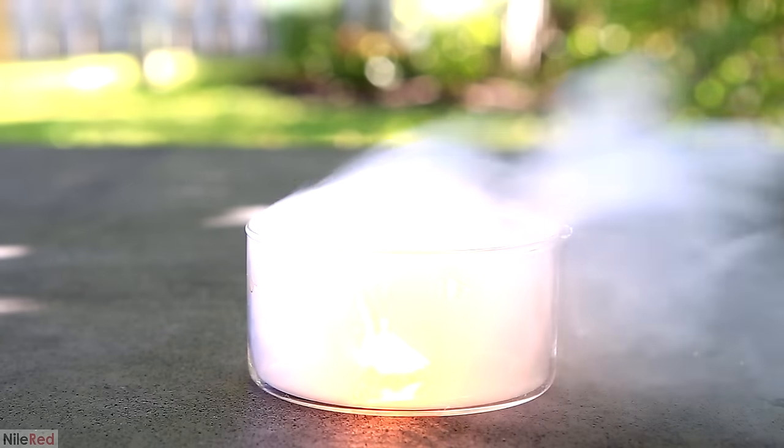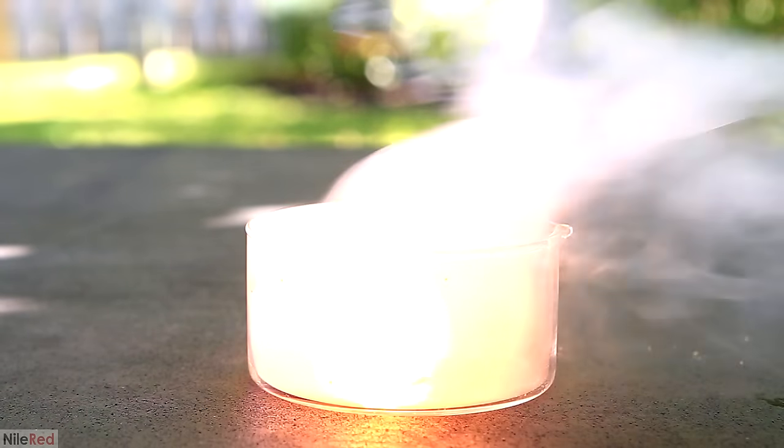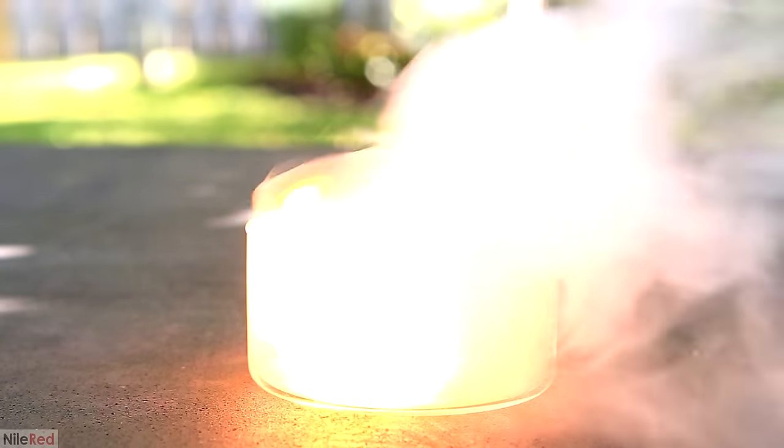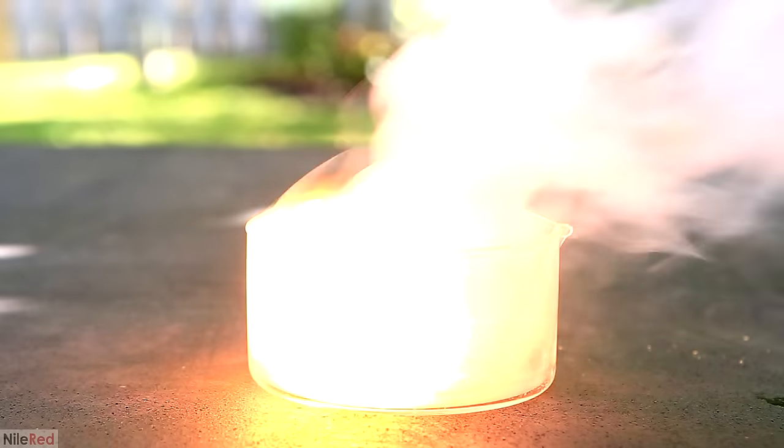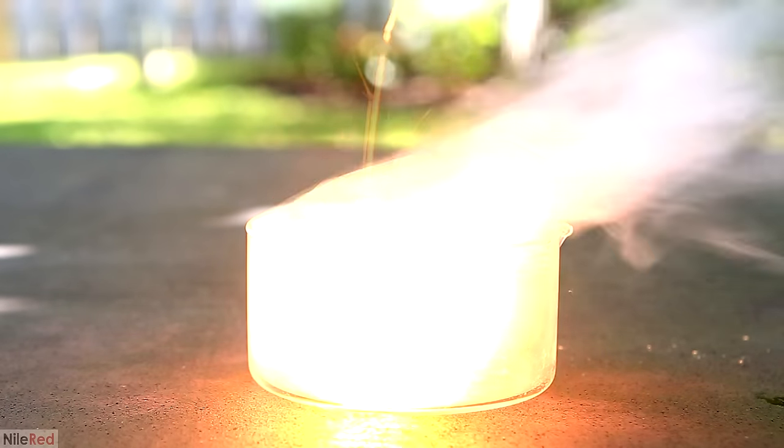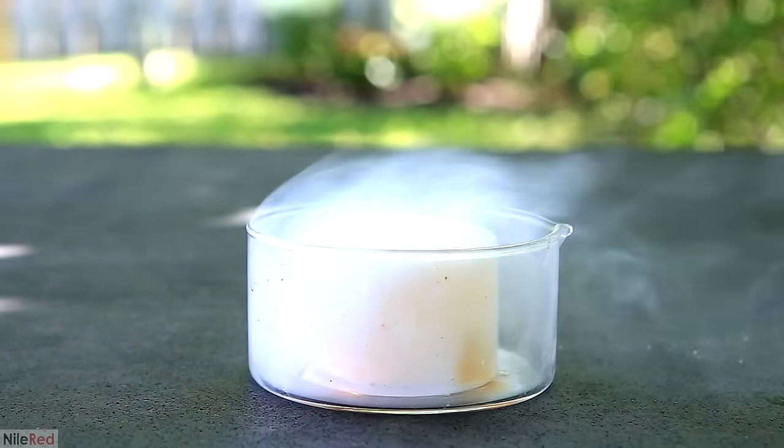White phosphorus is more reactive and it's capable of doing some different reactions. Once I make the white phosphorus, I will use it to make something called phosphorus pentachloride, which I will in turn use to make glow sticks.